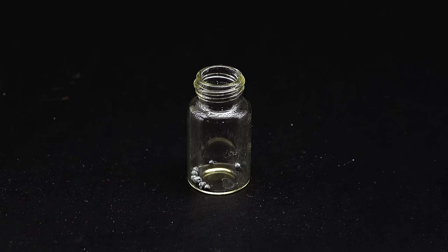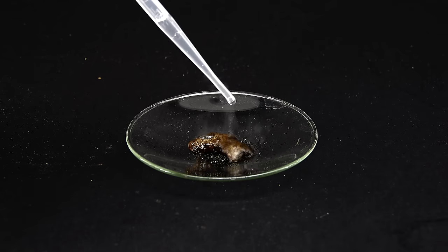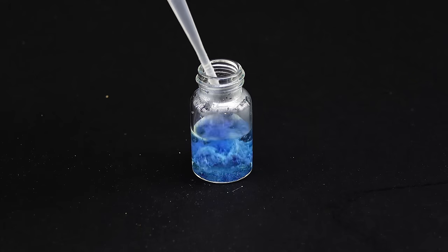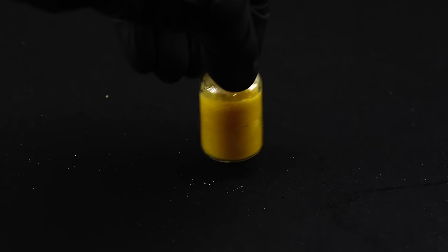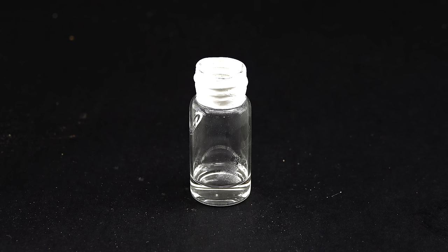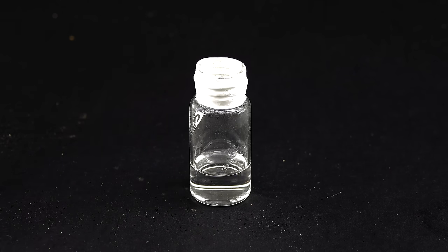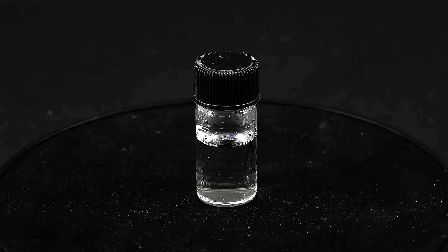Anyway, hydrazine also reacts quite vigorously with many other oxidizing agents like iodine, potassium permanganate, or potassium dichromate. It also can precipitate silver and copper from their salts, which showcases its main laboratory use as a strong and versatile reducing agent. In the future, I plan to use it for some cool experiments. For storage, I got all of my leftover hydrazine into a Teflon tape sealed vial, which will hopefully contain this toxic liquid for a long time.